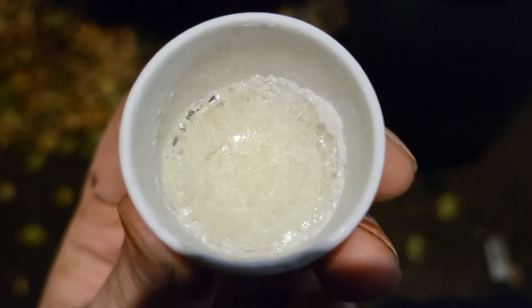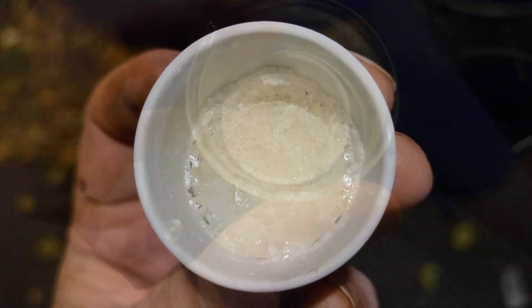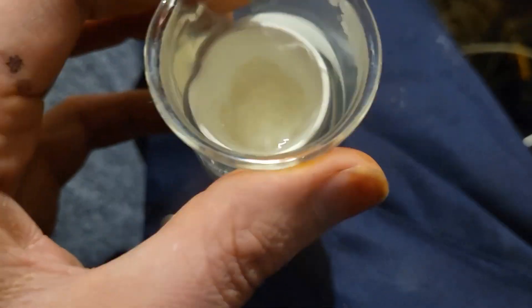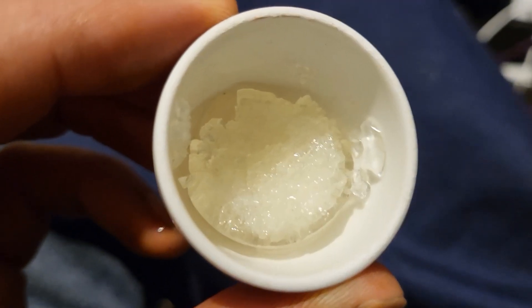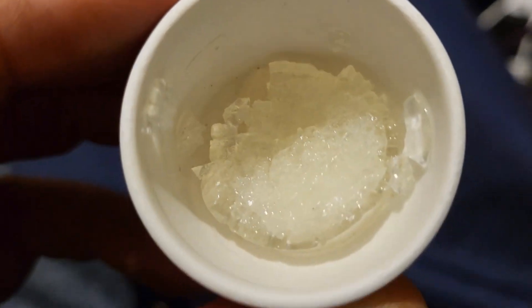There's an almost glassy appearance. We dissolve in a small amount of water. This could take a little while. I wasn't expecting these transparent crystals — quite interesting.